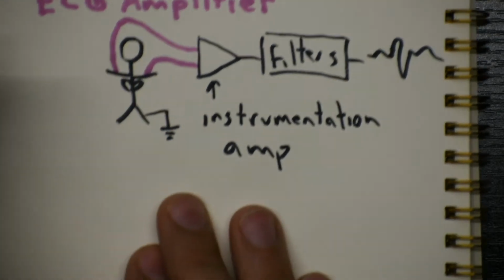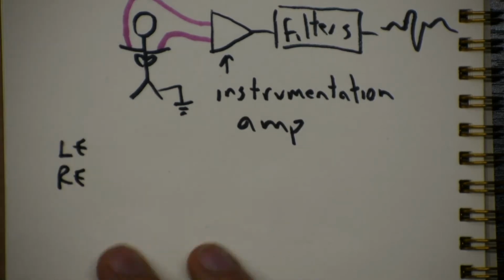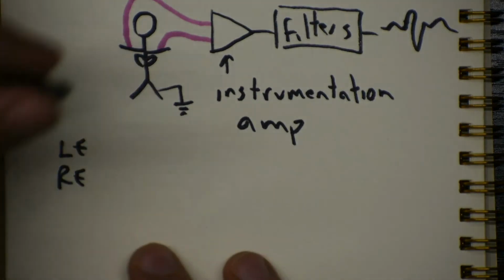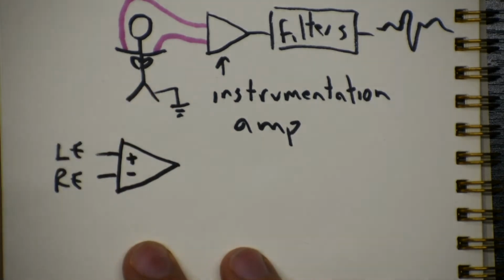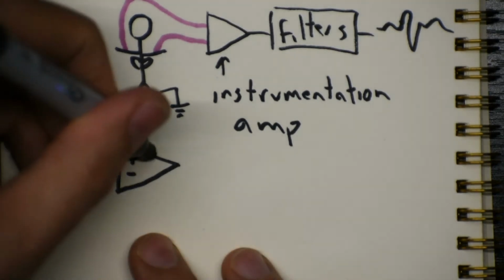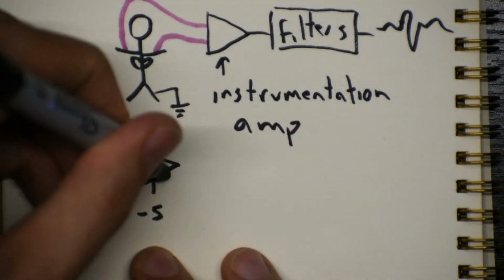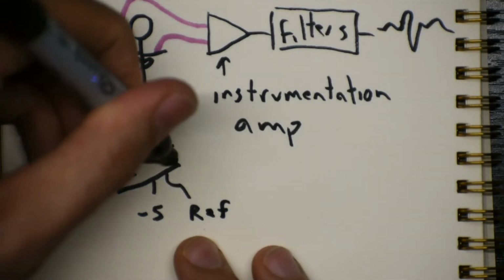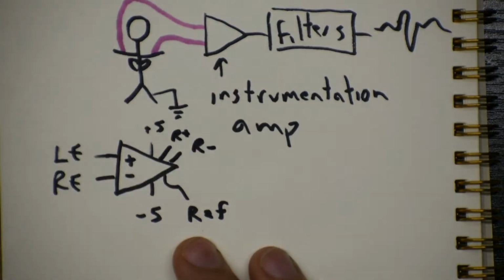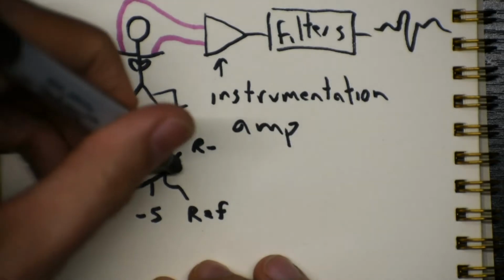Okay, so let's dig into this a little bit more. We are going to have a left electrode and a right electrode. So those are my electrodes attached to my wrists. And they're going to come into this instrumentation op amp, which works a little differently than a normal op amp. It still has a positive and negative input. It still has a +5 and a -5 volt input. It also has a pin called ref. And then two more pins, where should I draw these? I'm going to draw these over here. R plus and R minus. Okay, so in one 8-pin DIP chip, we have one instrumentation op amp. And of course it has a V out.